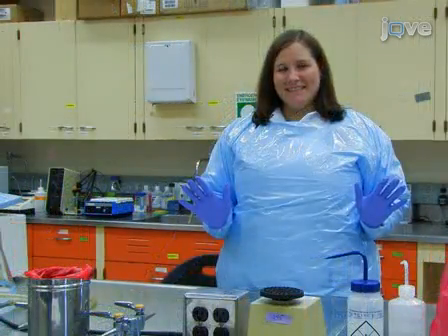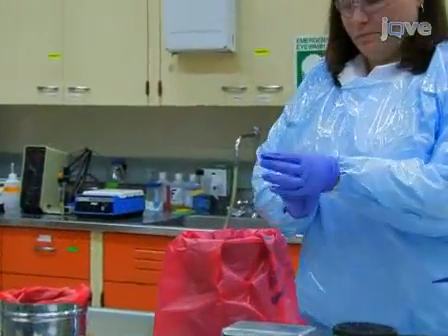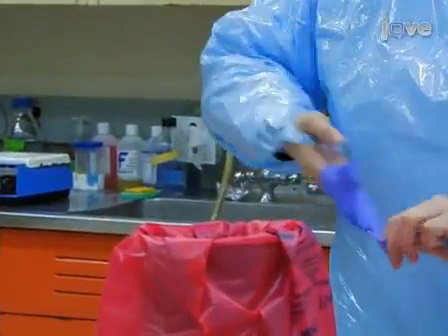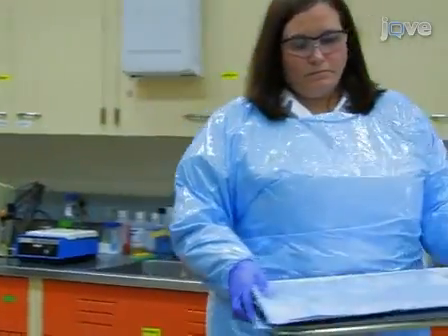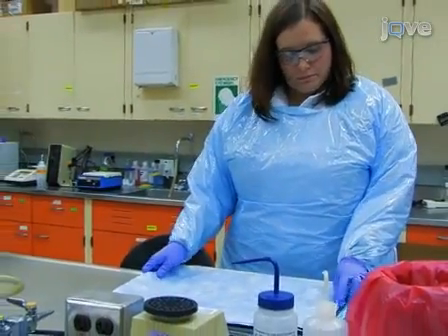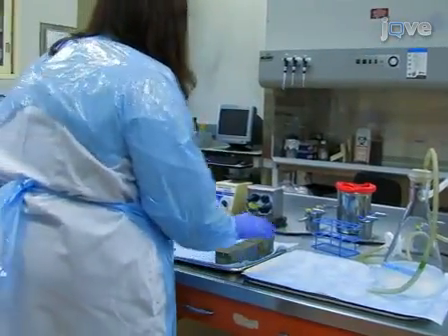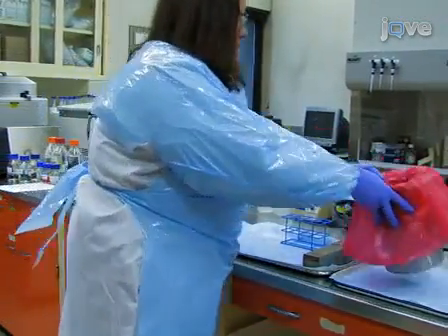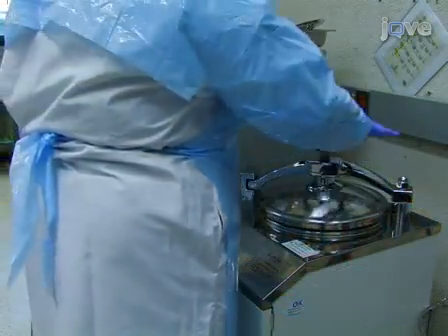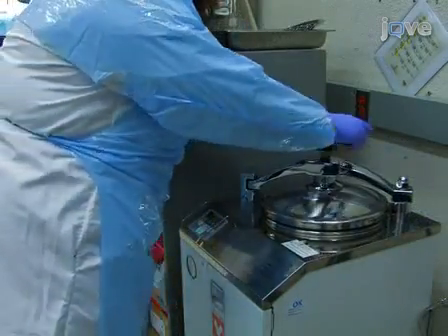Remember to wear a lab coat, disposable gown, disposable gloves, and proper eye protection or a face shield when handling T. gondii oocysts. Be sure to change your gloves often and avoid touching any equipment with contaminated gloves. It's also important to work on metal autoclavable trays lined with disposable absorbent liners, and along those lines, take a minute to make sure all of the racks, tubes and other equipment you plan to use are either disposable or autoclavable. If you're using non-disposable items, be sure to autoclave them after use for 2 one-hour cycles.